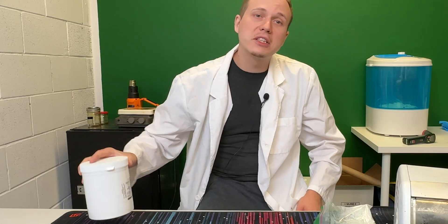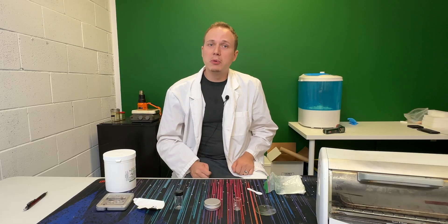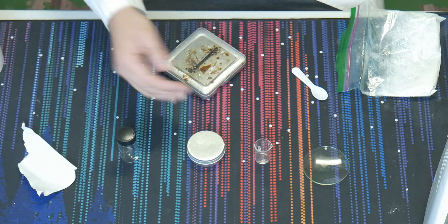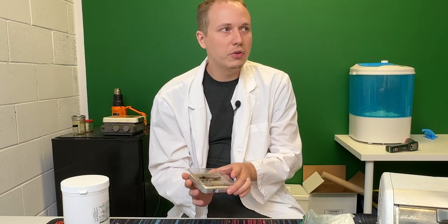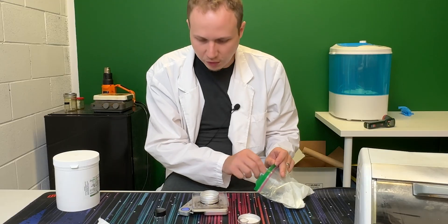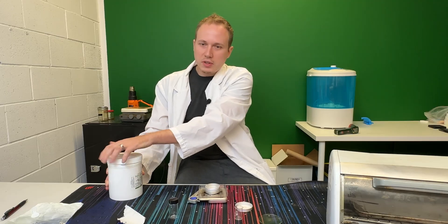The first step is you're going to mix your CBD and your Zeolite in a one to two ratio — so every one part of CBD is two parts of Zeolite. Most people recommend starting with 0.1 grams of CBD, but I'm going to go ahead and do a little larger batch here. I'll use a couple of different containers to show you how important it is to make sure that it is oxygen-free when you're heating it. So just get a scale and measure out your CBD. Here I have one gram of CBD isolate, to which I will add two grams of Zeolite.